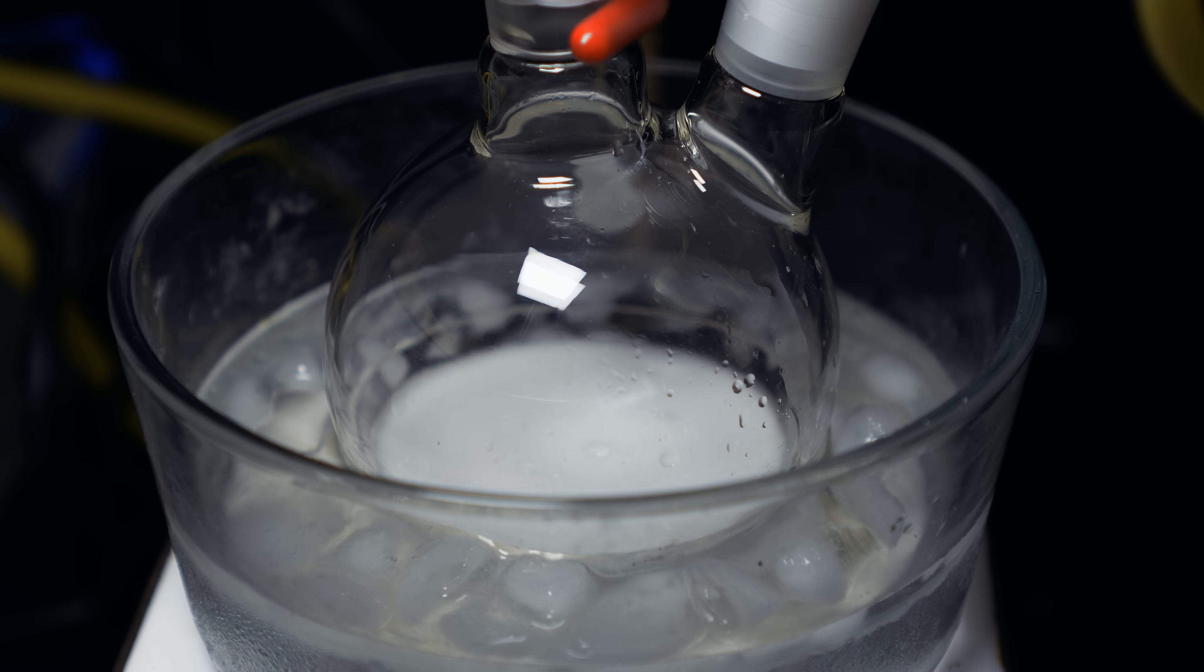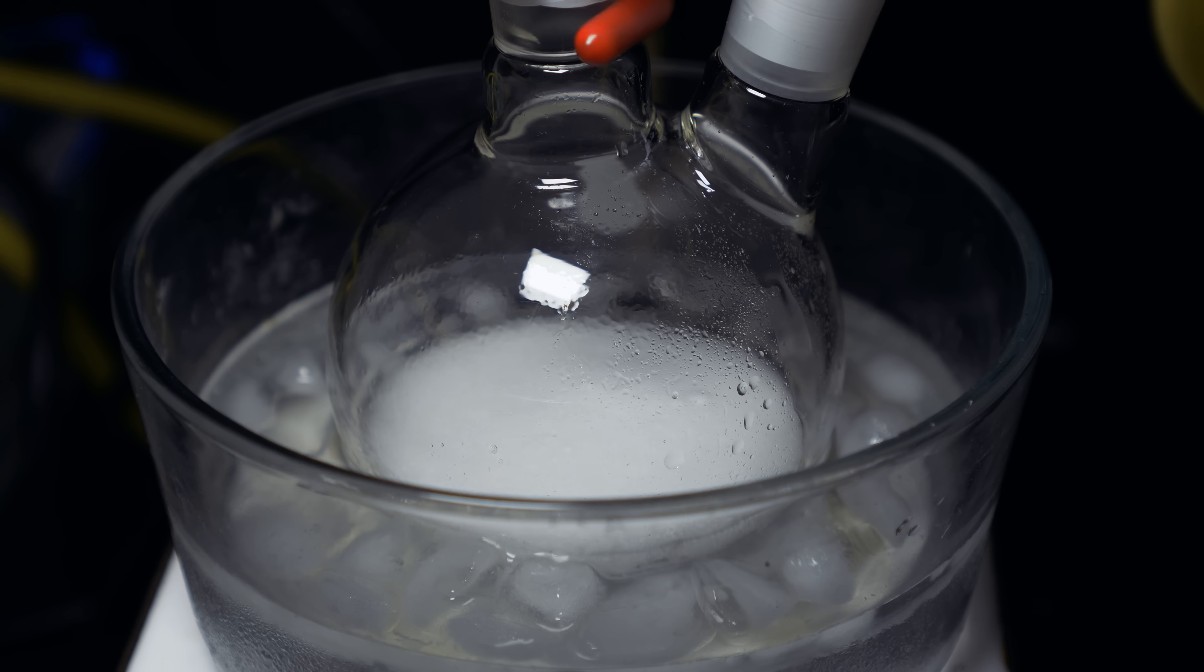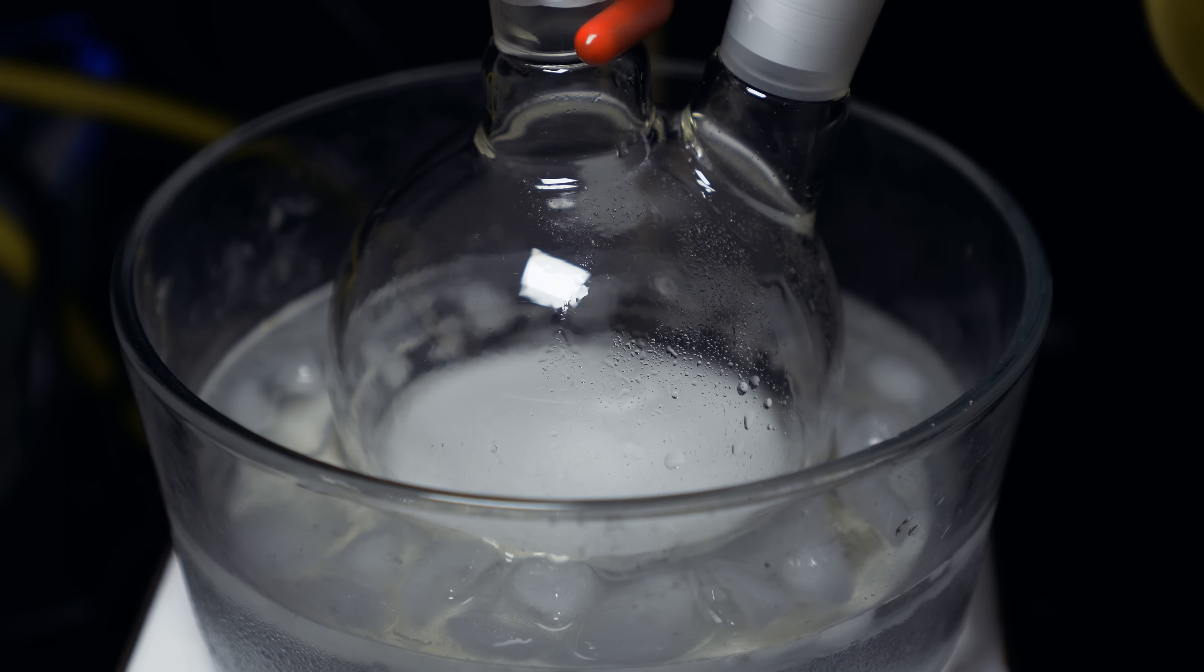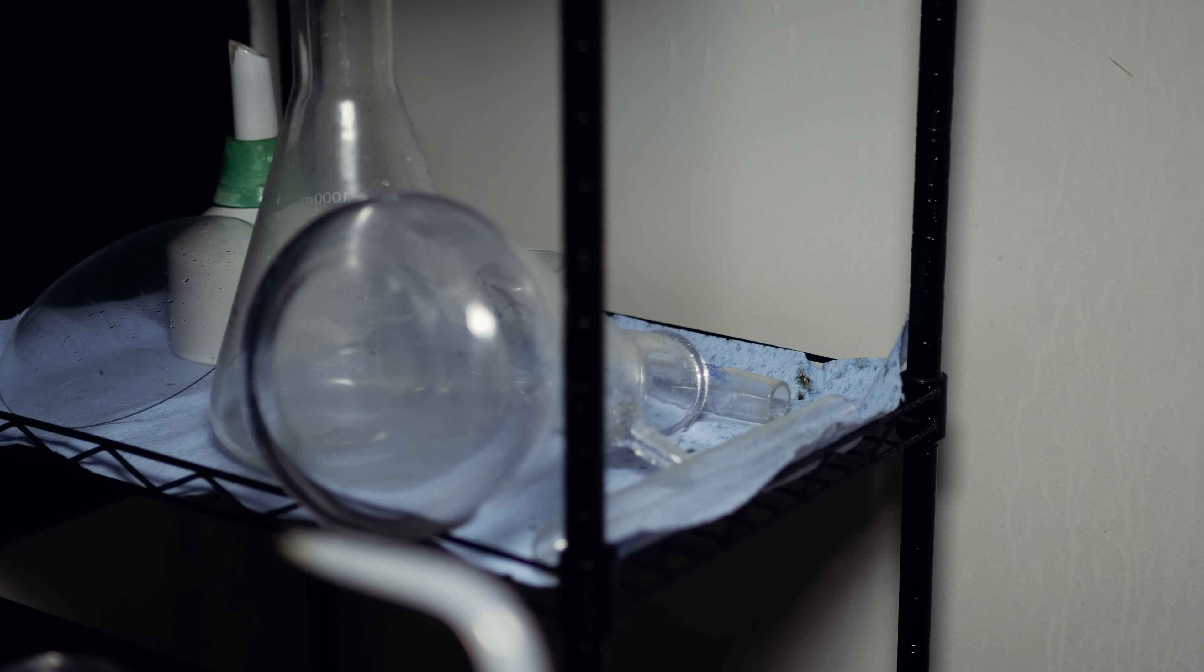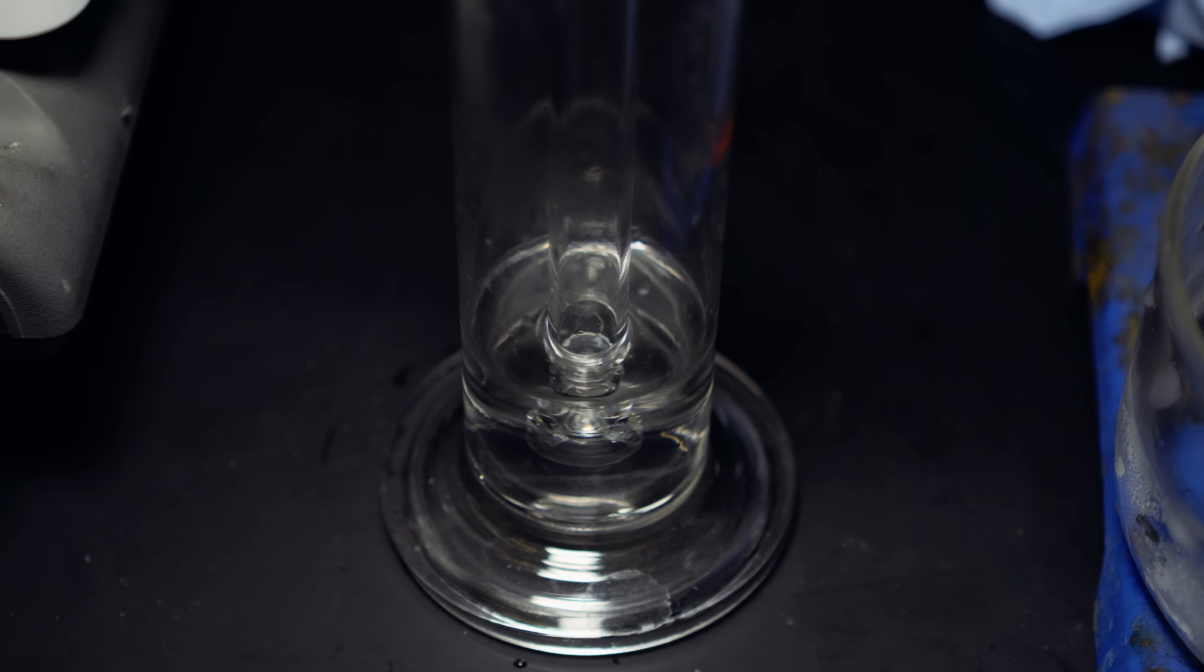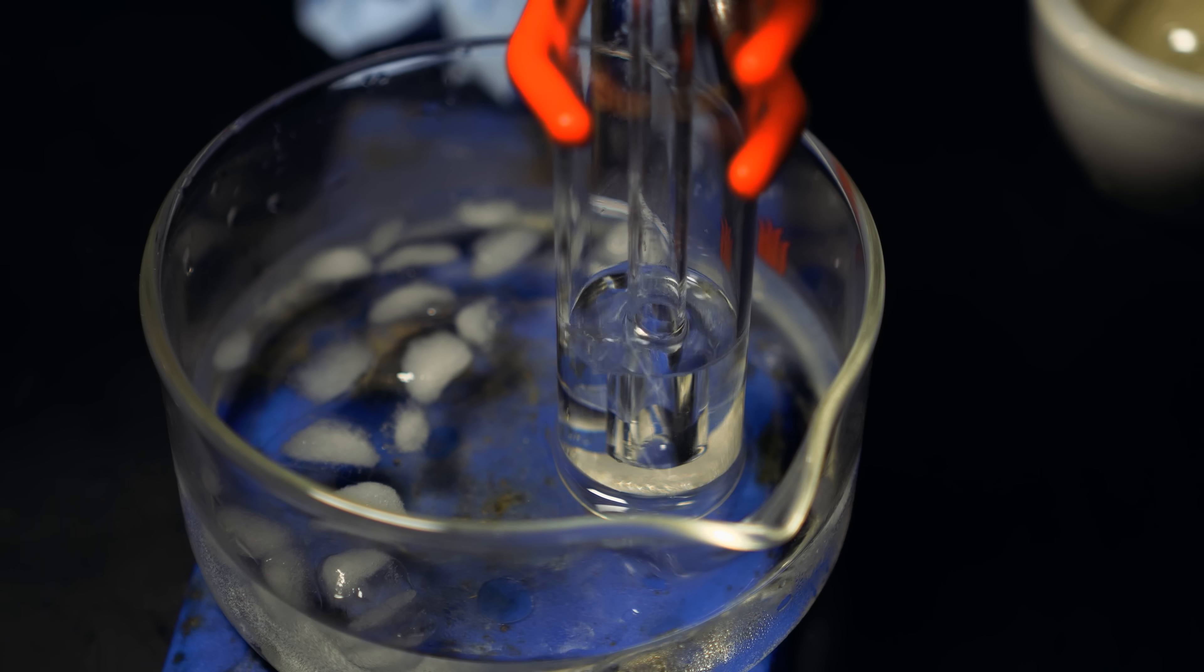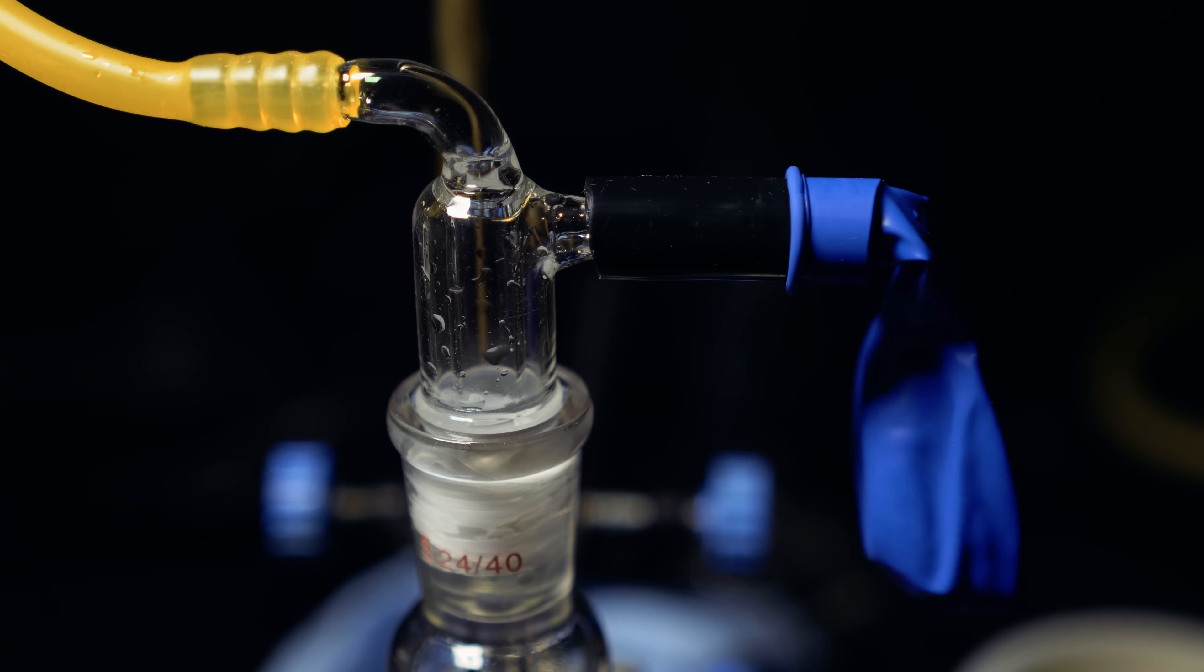So, I'm going to add the sodium nitrite solution to the hydroxylamine hydrochloride solution, and we get some bubbling. This is pushing nitrous oxide through our system. Though, since I had my tubing on wrong, it only pushed concentrated sulfuric acid all over my shed. So, while I achieved the flushing of the system, I also flushed some of the paint off of my walls. However, once I fixed the tubing, you can see that we have our gas being pushed into our sodium hydroxide solution. The nitrous oxide then bubbled its way into the sulfuric acid solution. Once I let it flush out for about 10 seconds, I then put on a balloon. This should be collecting our relatively pure nitrous oxide.